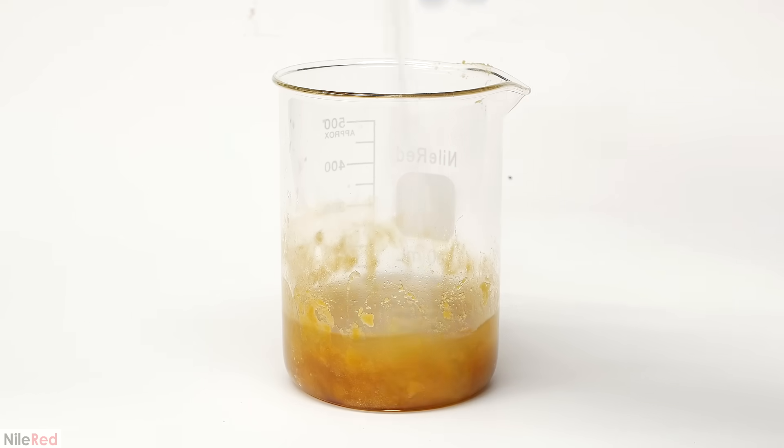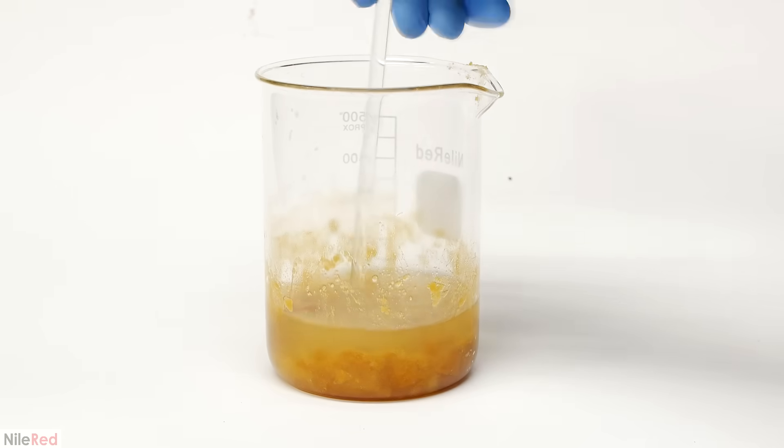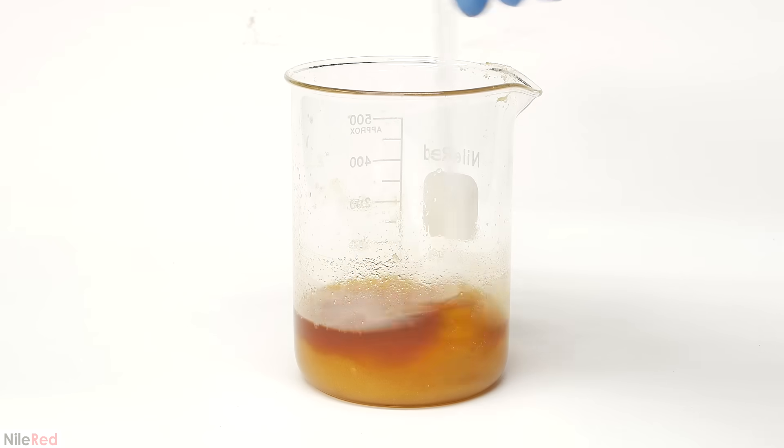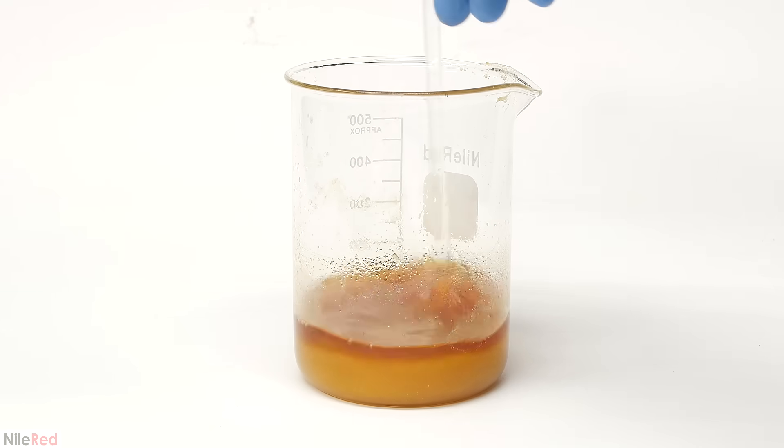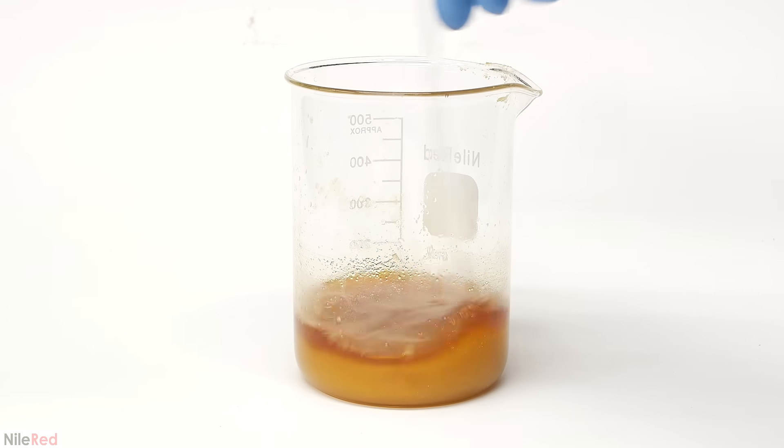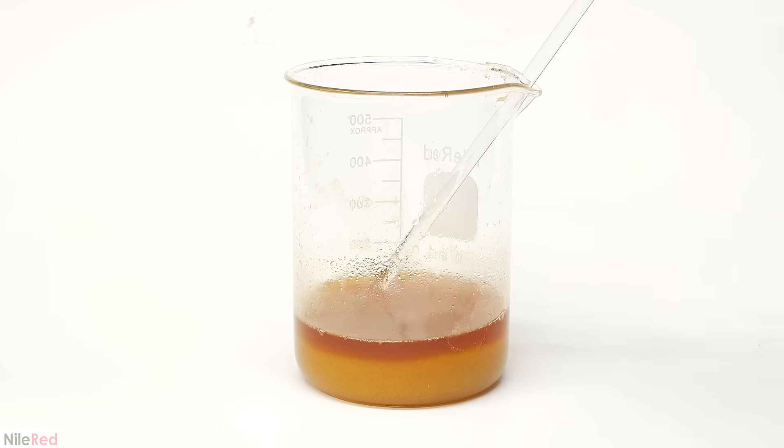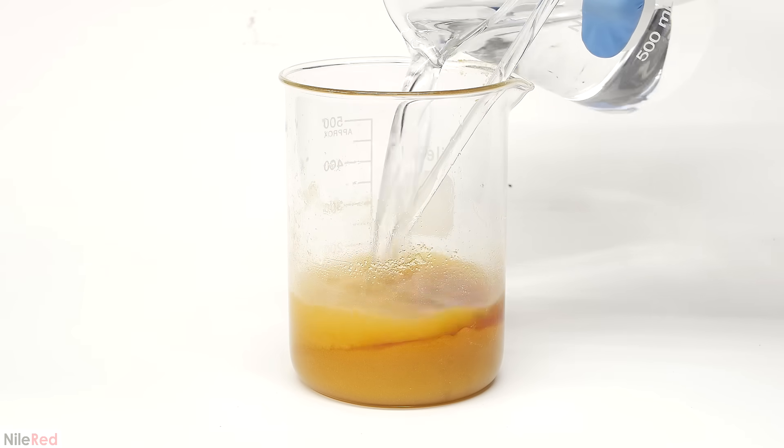I add a small amount and mix it around to break up all the large chunks. It looked pretty good after a few minutes, and I was gonna go ahead and filter it. However, at the last second, I decided to add more ethanol.